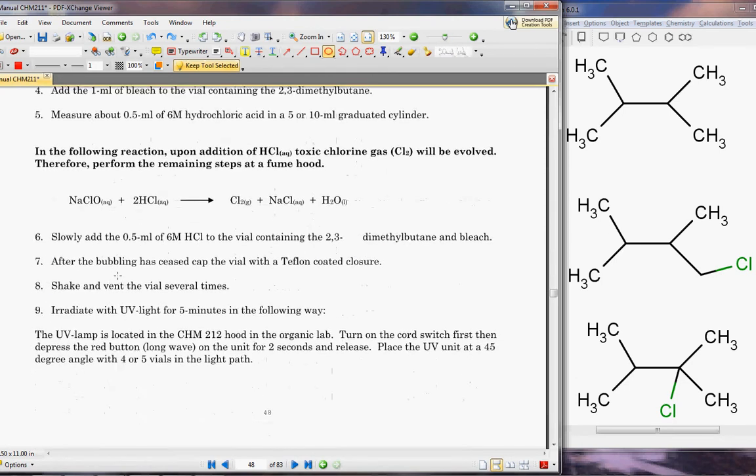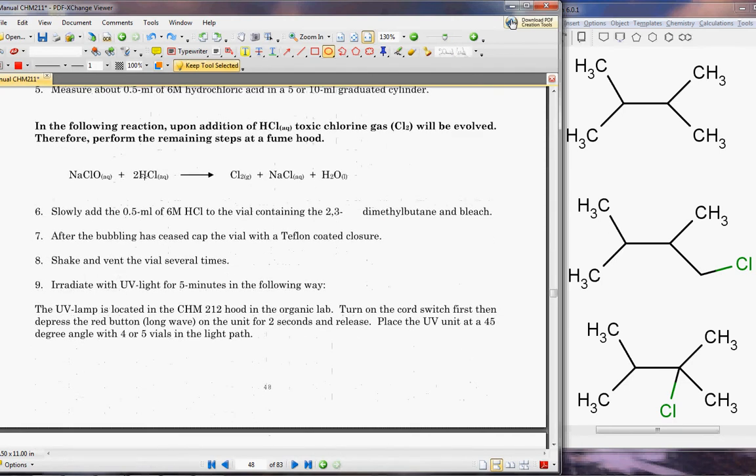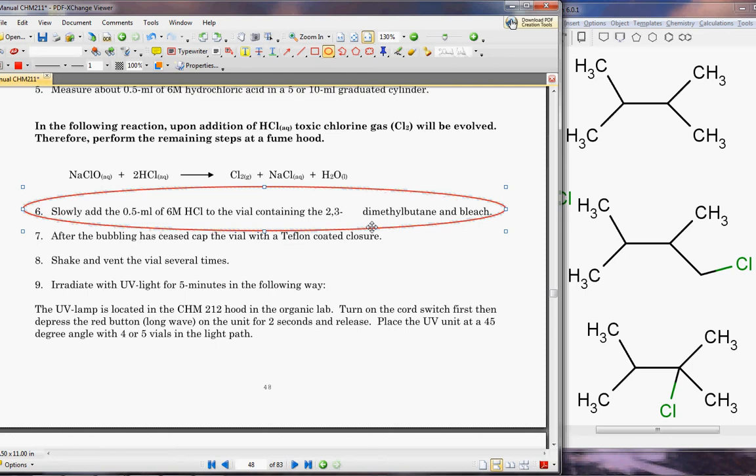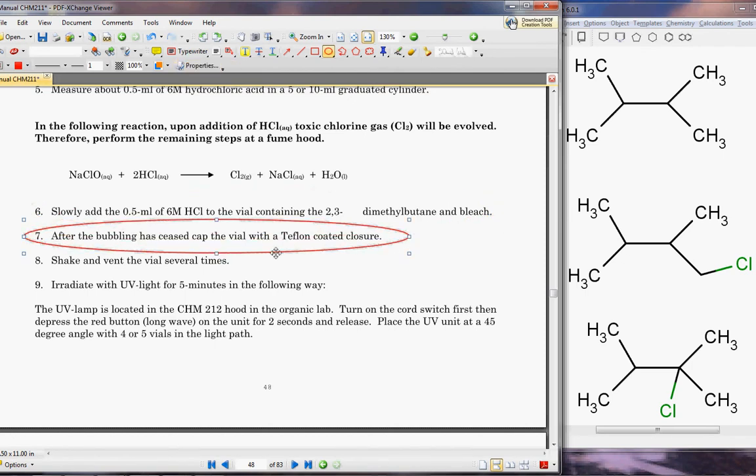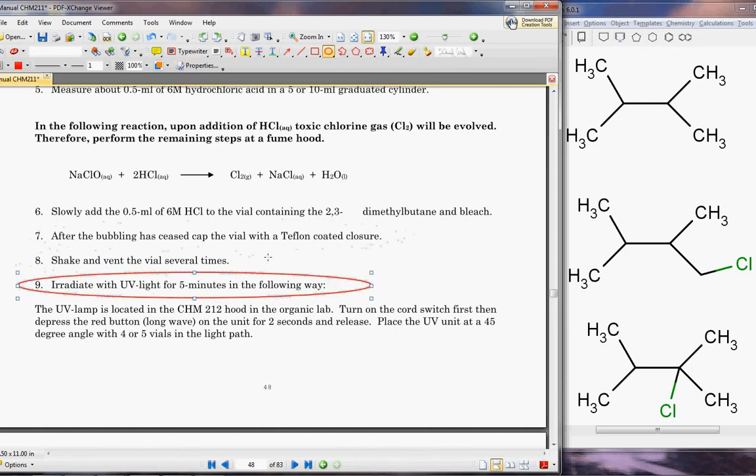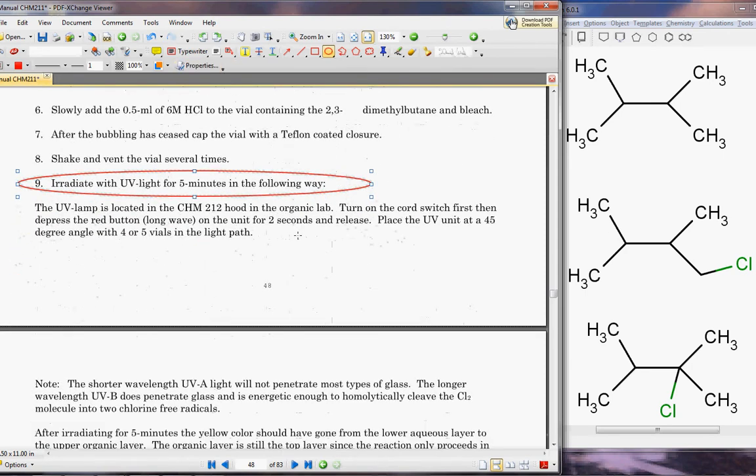Then we're going to add hydrochloric acid to our cylinder. Up until then, you can do this outside of the hood. After this, this is when we're going to produce the chlorine gas, so you really want to put this under the hood. Then we're going to slowly add the hydrochloric acid to the dimethylbutane and bleach. You're going to see bubbling, and once it stops, shake and vent several times. Then initiate the reaction with UV light.